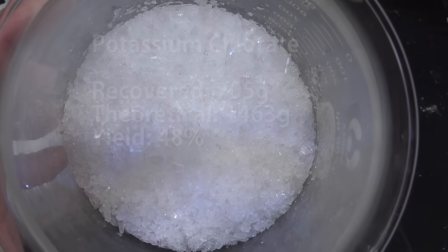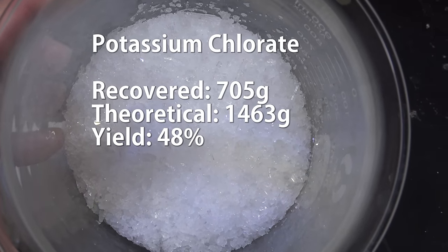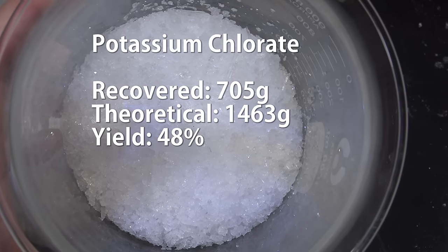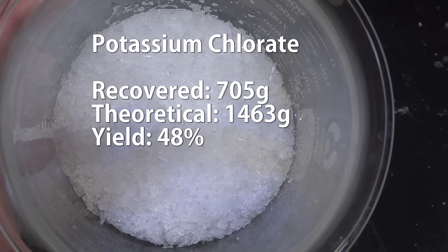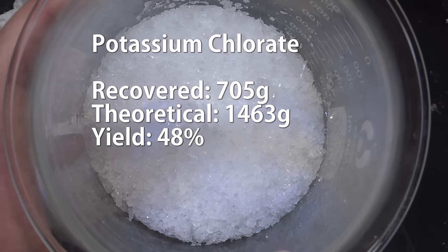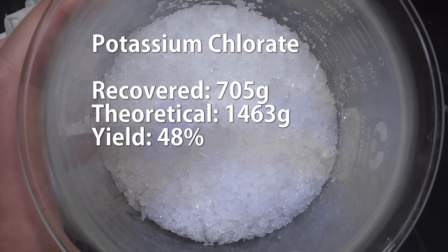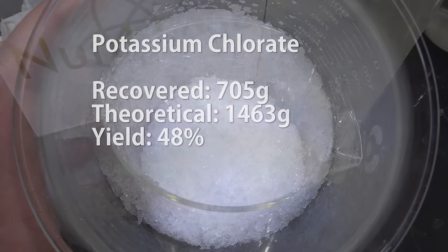Our recovered yield was 705g after 40 days at 2 amps. Under theoretically ideal conditions for the same amount of time and current we should have 1463g of potassium chlorate. So our yield was 48% of maximum.